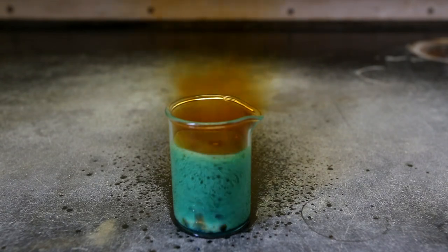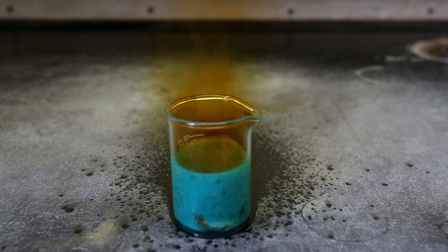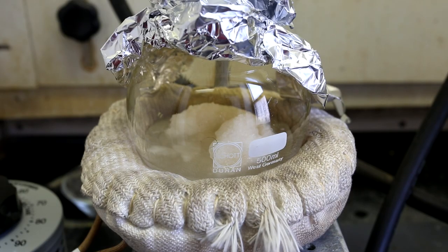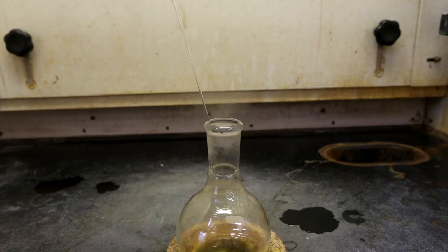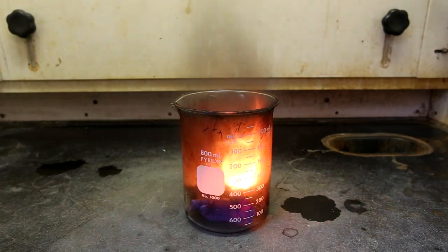Commercially available nitric acid is usually around 68%, whereas fuming nitric acid is greater than 86% nitric acid. The uses of fuming nitric acid are rather limited compared to the conventional 68% nitric acid. One interesting use is its use as an oxidizer in liquid-fueled rockets.